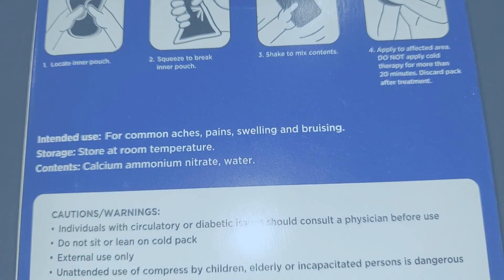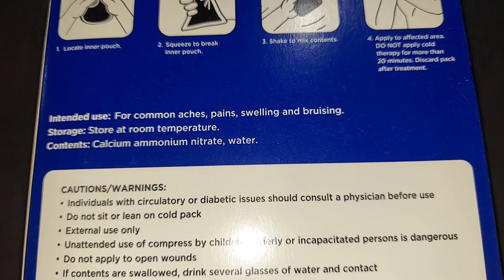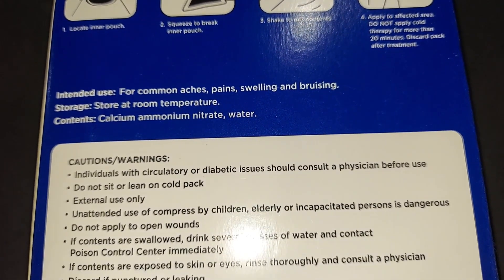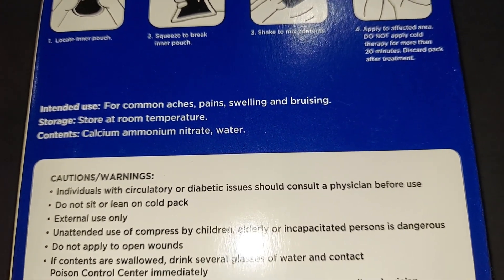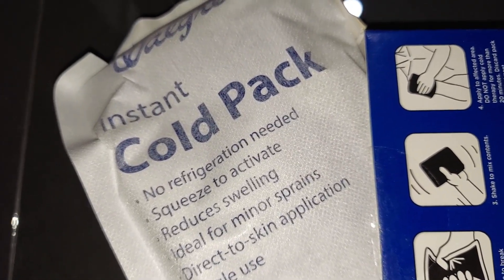As ammonium nitrate has become more dangerous to sell, a lot of cold packs have become calcium ammonium nitrate. Even urea used to be in them but it's hard to find. So we're gonna start with this of course to make our potassium nitrate. I need to open these without breaking the water bag.